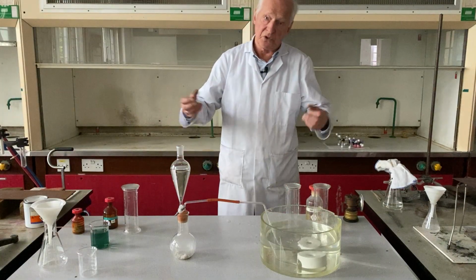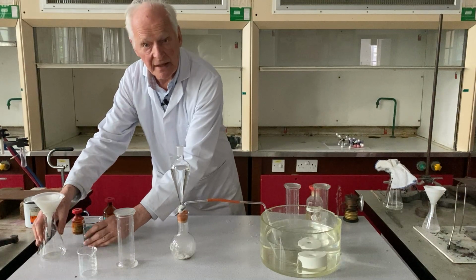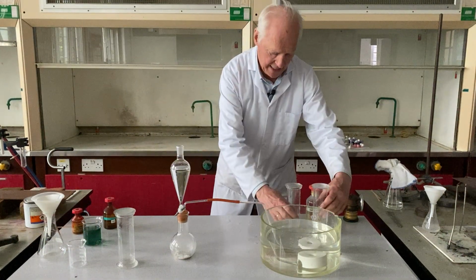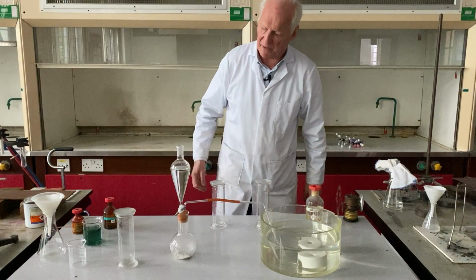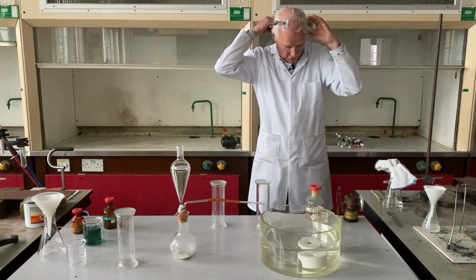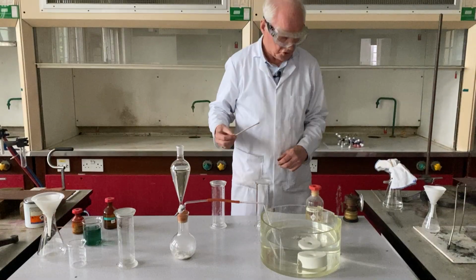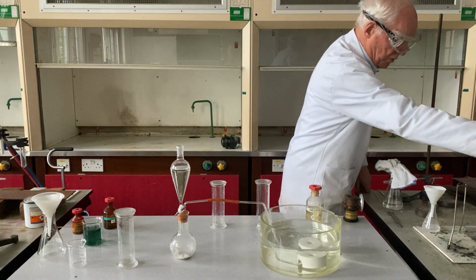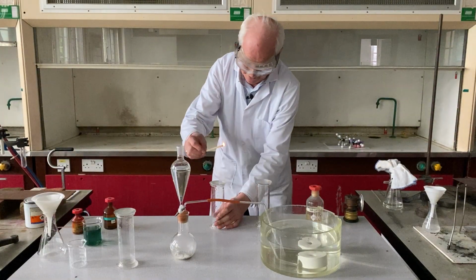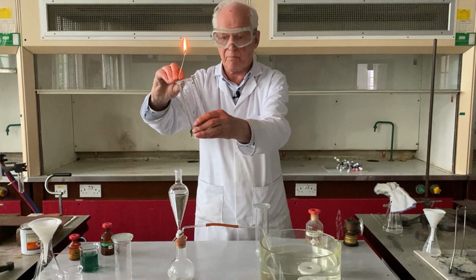So, what I wanted to do first of all is to illustrate for you the flammability of acetylene gas by placing a lighted splint to the mouth of the jar. Now, for that purpose, I will put on my goggles here, and you'll see an extraordinarily yellow, smoky flame. And the reason for this, let's do this very carefully, we'll hold it up, there is no hurry. What I'm going to do is to remove the cover slip and then apply the flame.